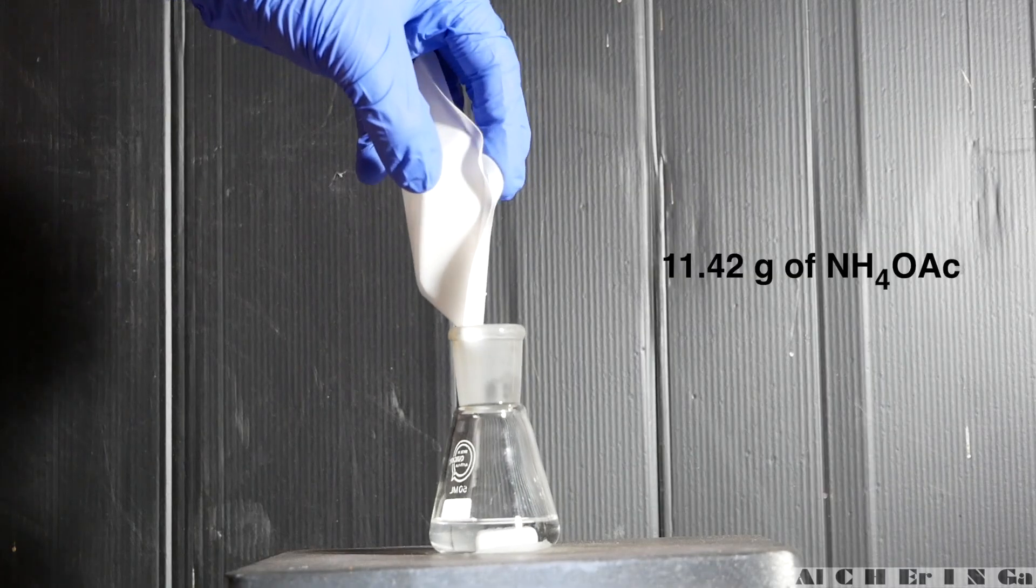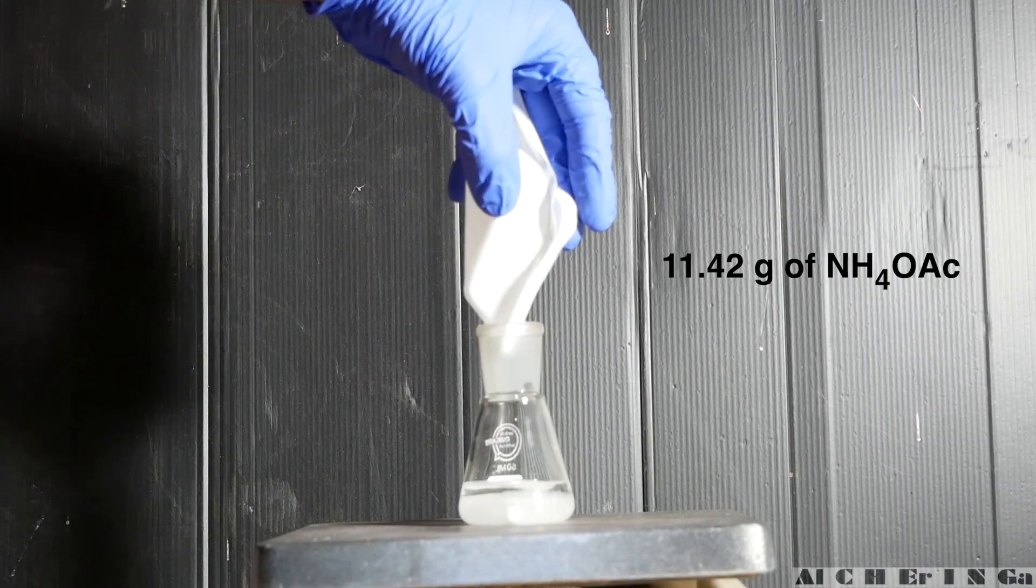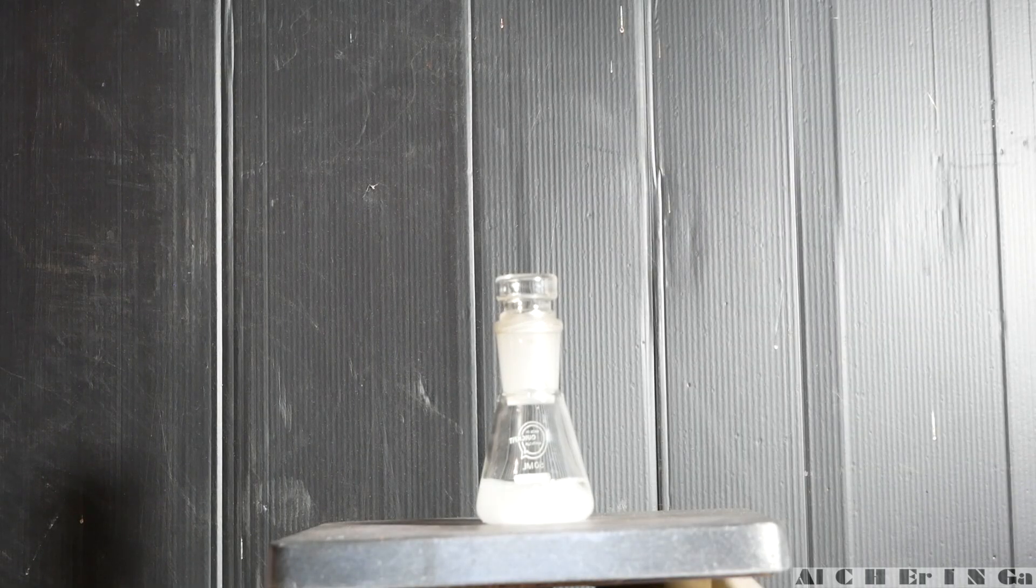Then, add in 11.42 grams of ammonium acetate, stopper the flask and start stirring for a few minutes.